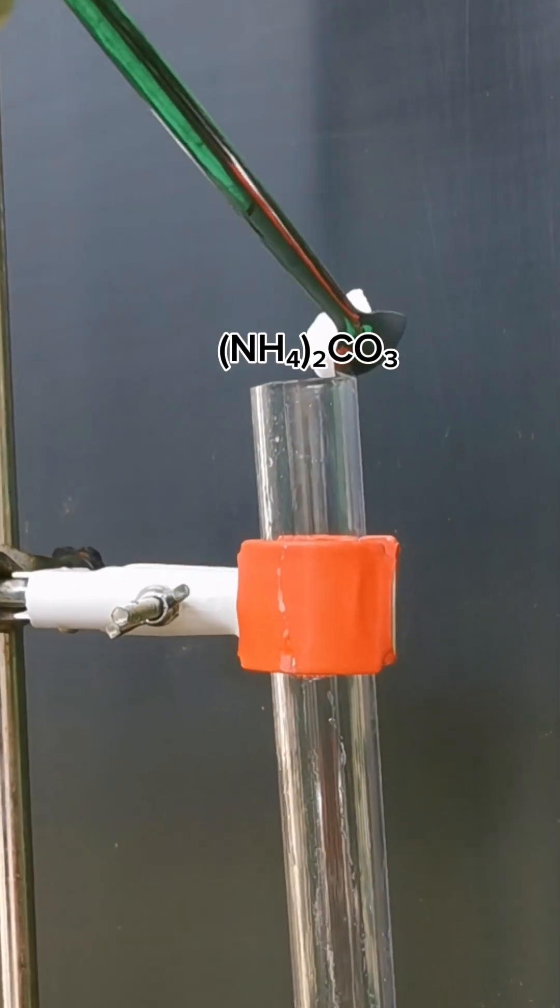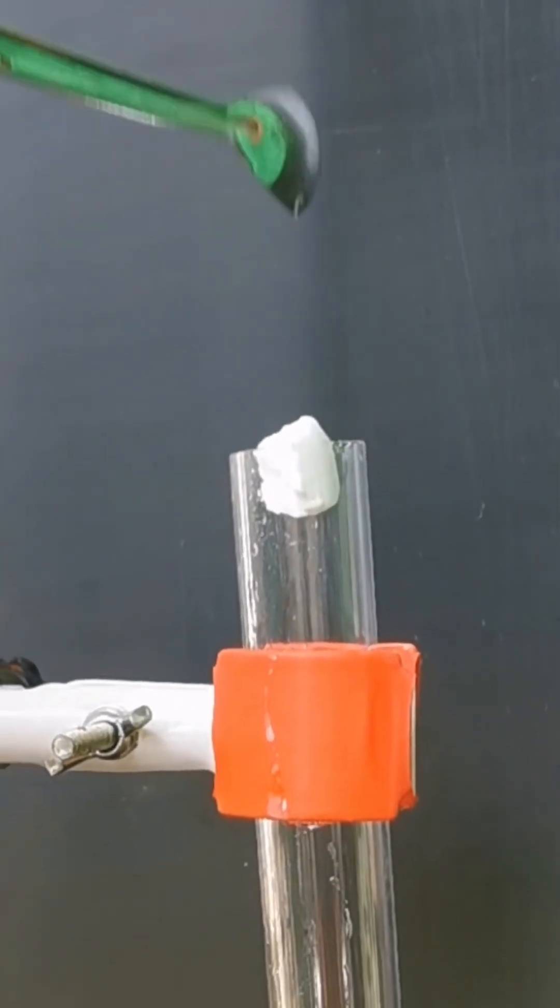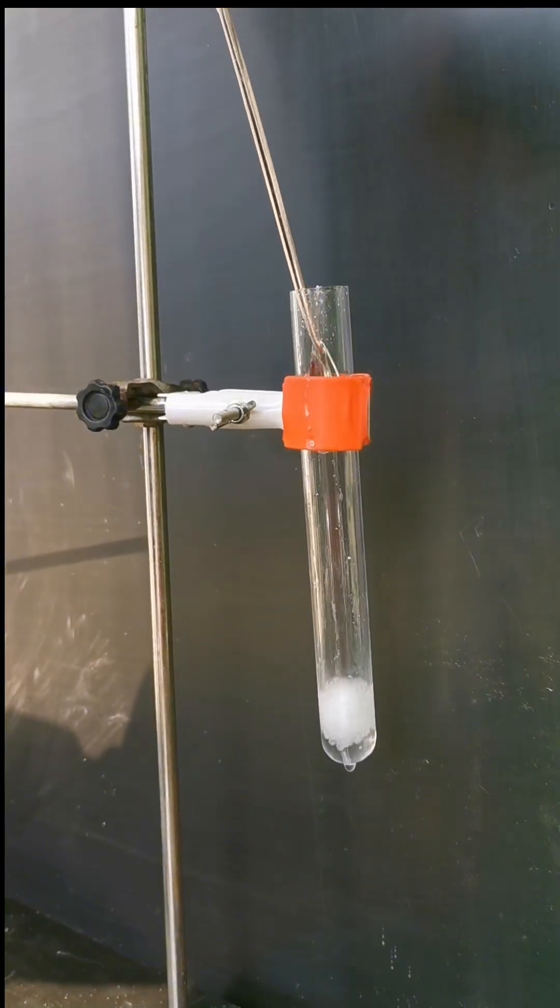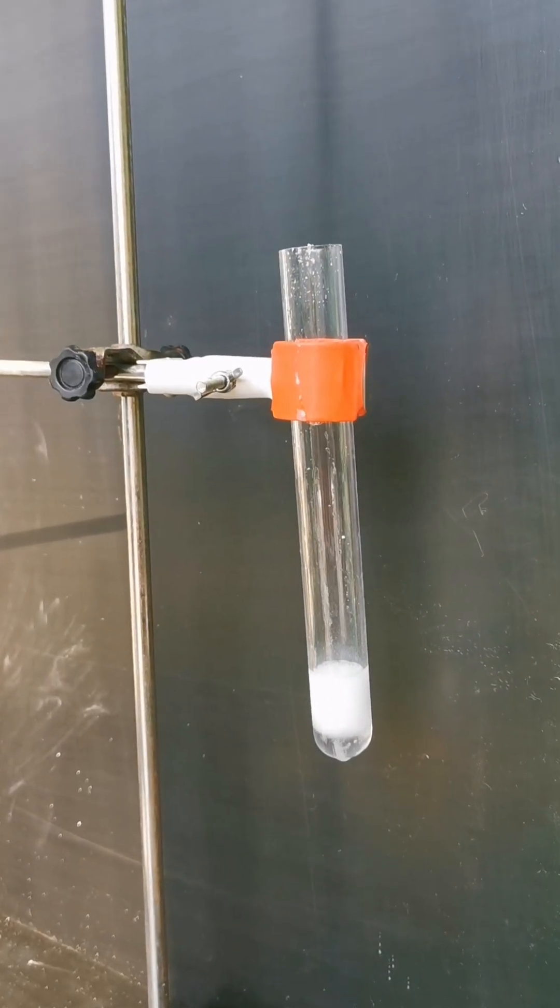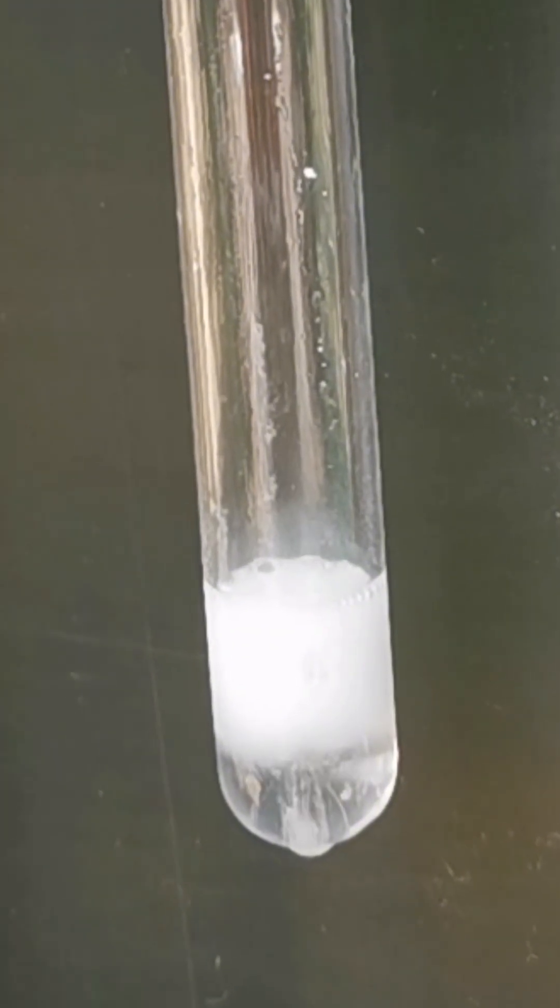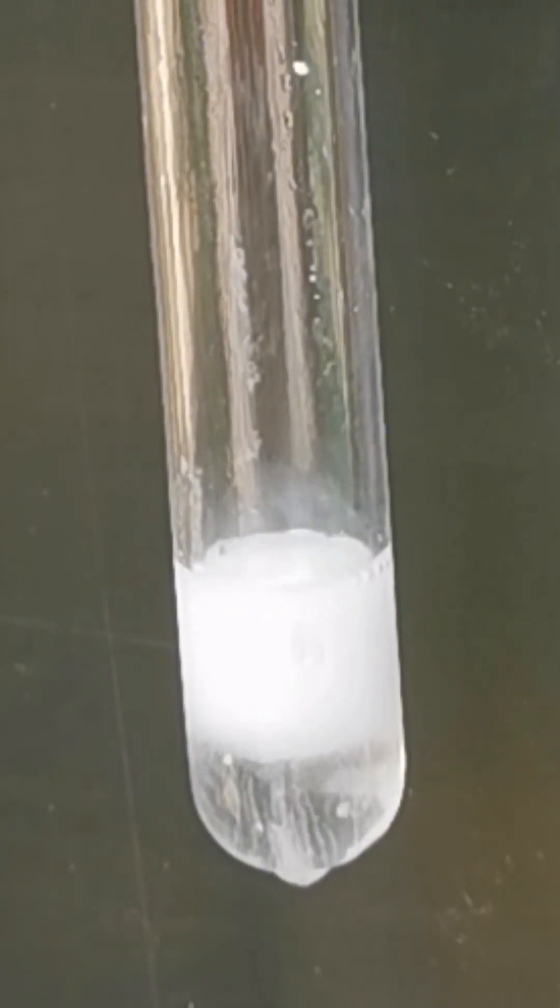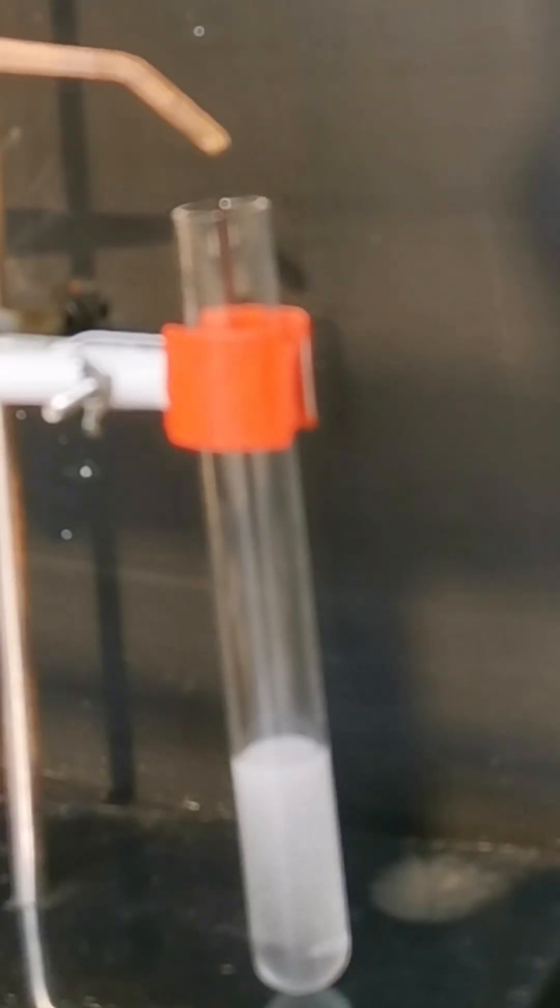This piece of ammonium carbonate is too large, so it can't slide into the tube by itself. It produces some nitrogen and carbon dioxide gas. This reaction can occur spontaneously.